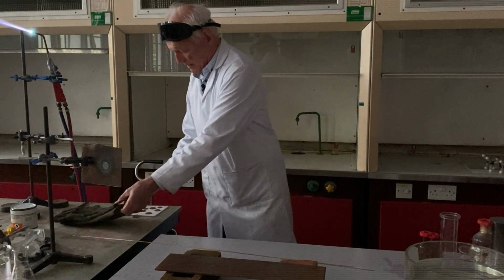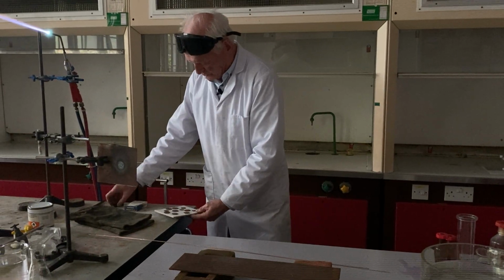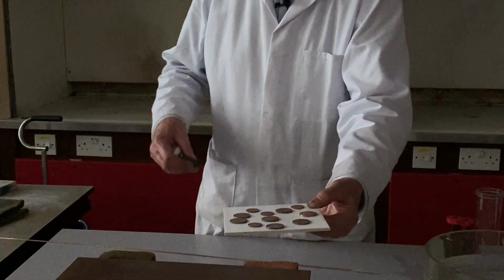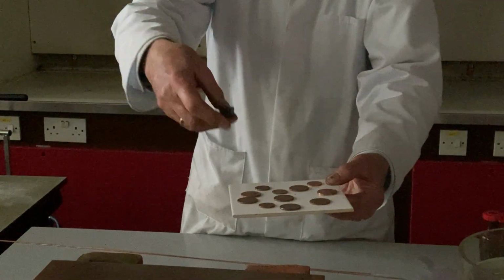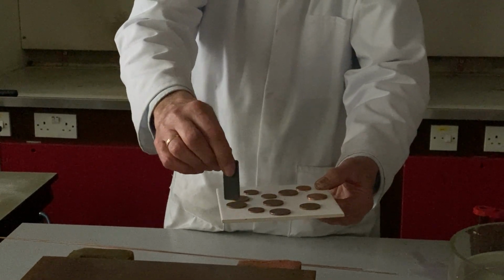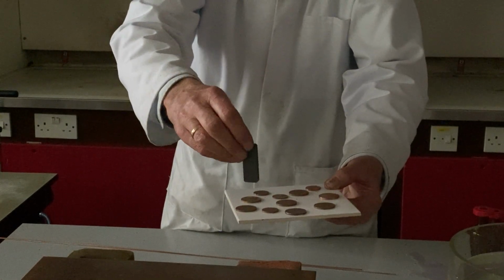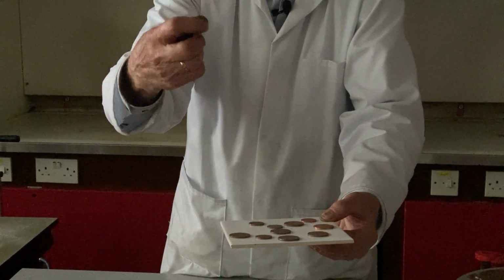And rather than welding something conventional, I've got something here which I thought we could make practical use of. Now, this is a selection of coins, 2p and 1p pieces. And if I use my magnet, you'd think they're made of copper, but not always. If I put my magnet there, nothing happens, you see. No reaction, it doesn't pick up. Well, obviously, that's a copper coin, but then if I put it here, you see that coin is clearly not copper. That's mainly steel.